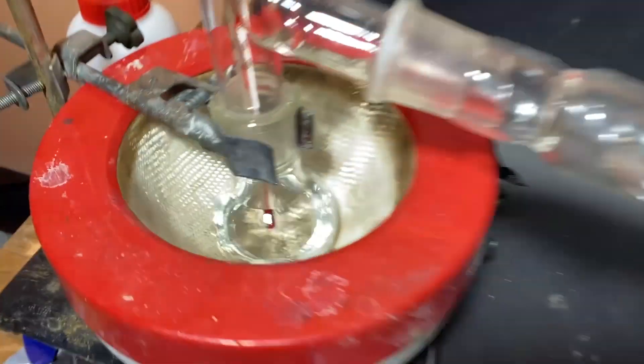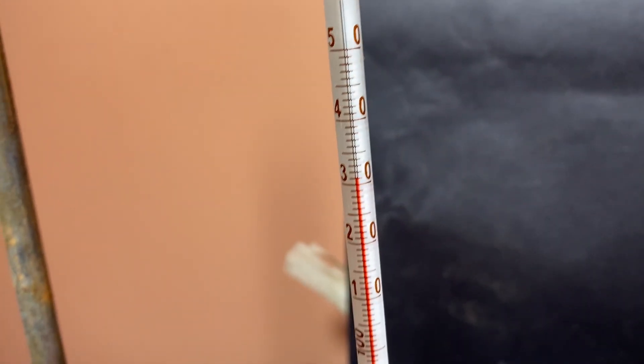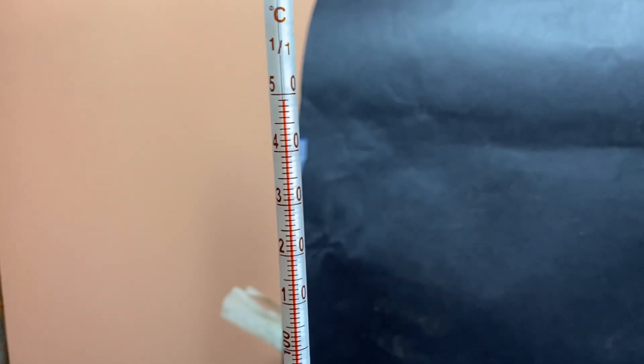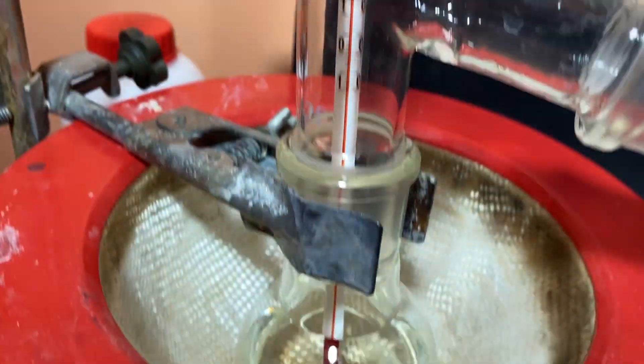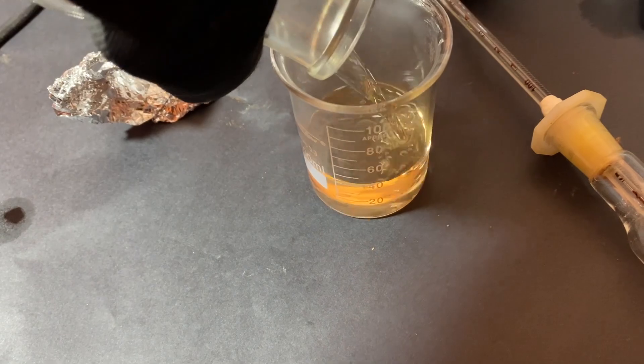So I start up the heating. Once the temperature of the solution reaches around 130°C, a bunch of liquid starts condensing. This liquid is most likely ammonium acetate, water or even acetic acid. Once the temperature reaches 150°C, there seems to be nothing coming over. So I've decided to stop the heating and transfer the remaining solution into a beaker.